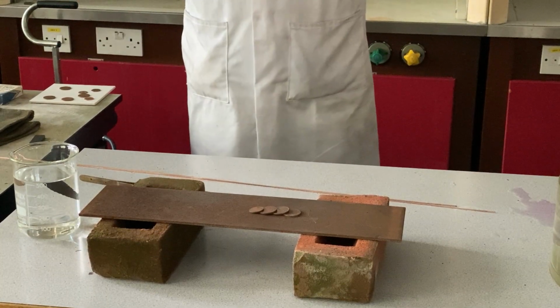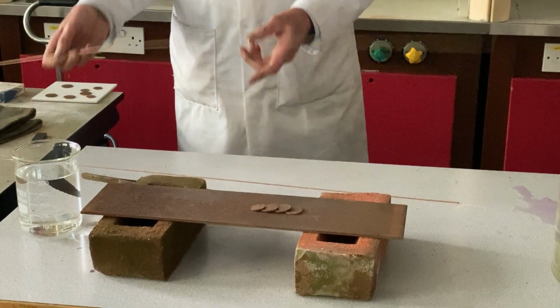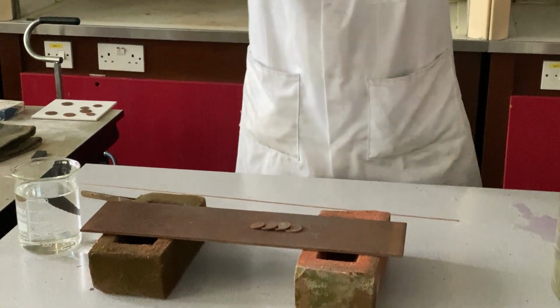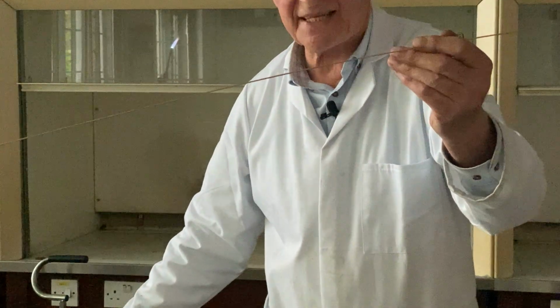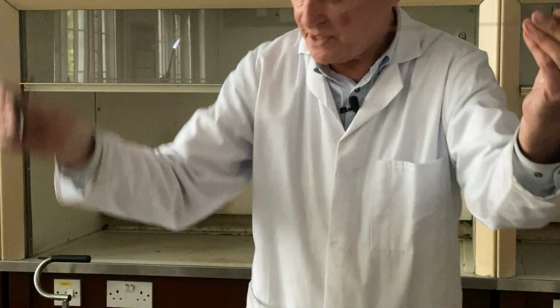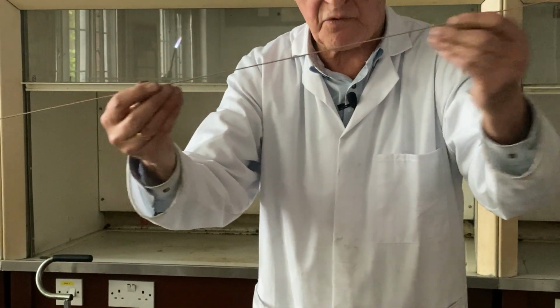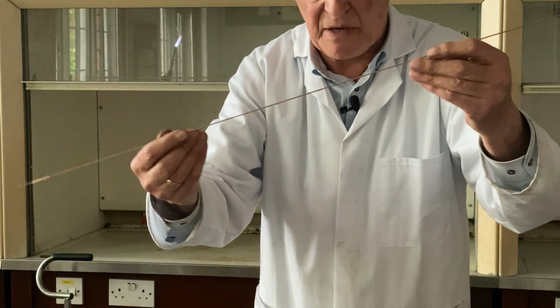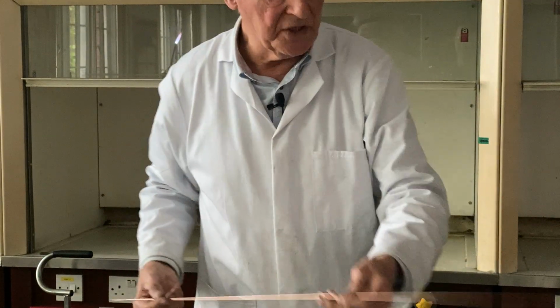Once again, this is a very difficult process. And in order to do this, we have to use a welding rod. Now, this welding rod here, you'll see, it's got a copper colour on it, but of course, it is steel, in fact, and there you are, we can hold it with our magnet. And the reason why, of course, it's coated with copper is to protect it from rusting. Iron is very, very prone to rusting in a moist atmosphere, and therefore we need to protect it.